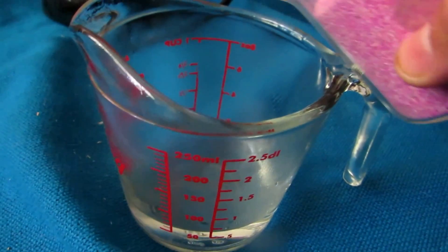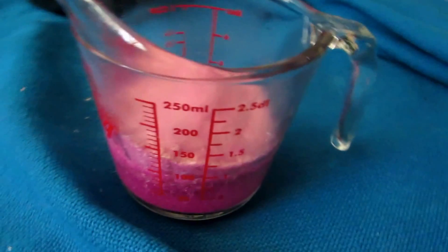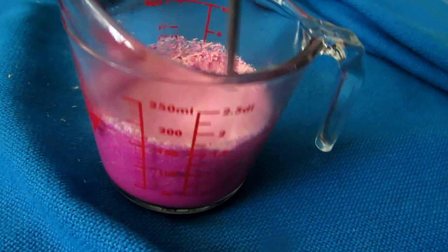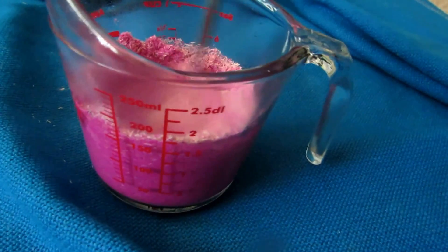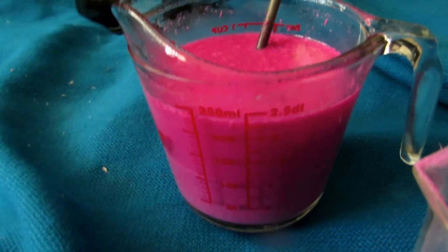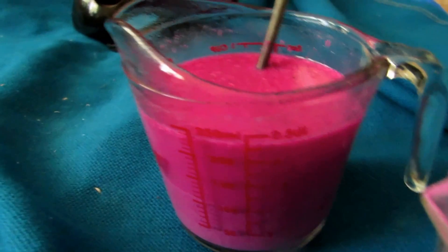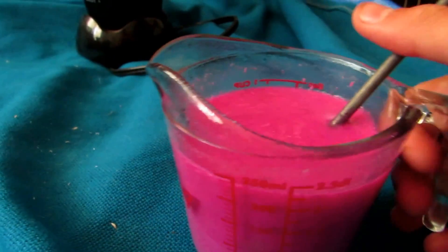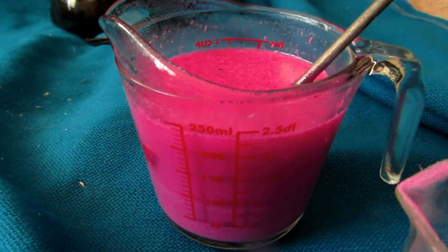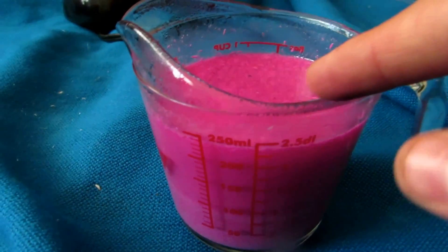We're going to add all our match powder in — it's a lot, and we may have to add more water and do several recrystallizations. We're just going to stir it up to try to dissolve all the potassium chlorate. I ended up adding way more water because that 50 milliliters was just absorbed by the wood and whatever else was in the match. Now we have a nice slurry, and after letting it stand for about two minutes with constant stirring to make sure most everything dissolved, we can filter this off.